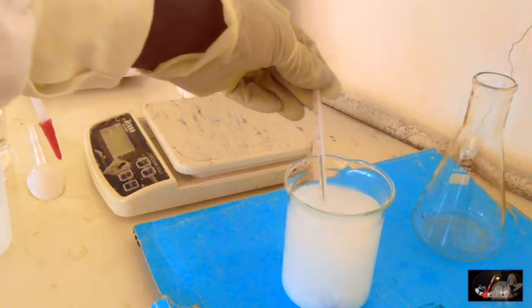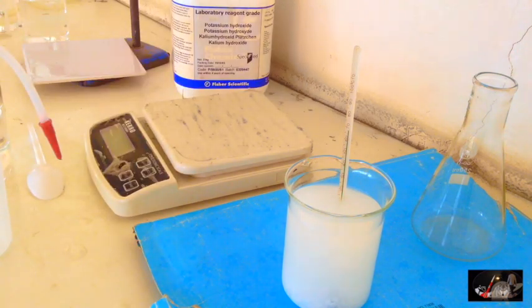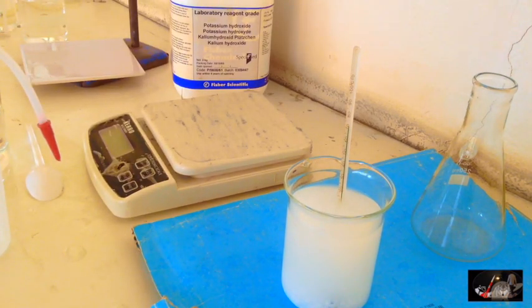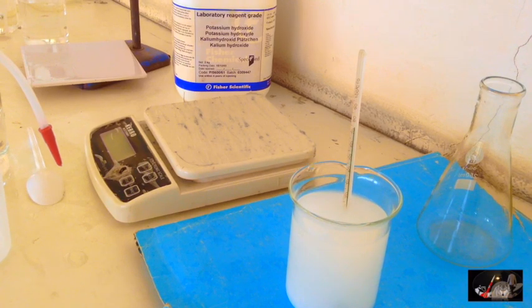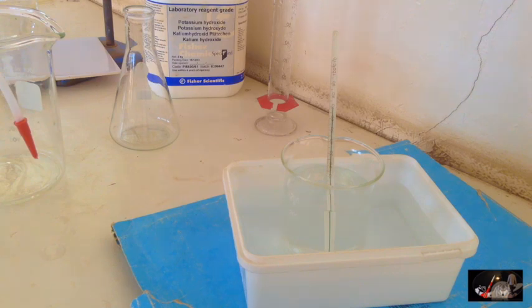I have placed a thermometer inside the solution to show the rapid rise in temperature as the salt dissolves. The solution will appear cloudy but will eventually turn to a clear solution as it cools down. To increase the cooling rate, I place the entire setup inside this water bath. This can be accelerated with ice.